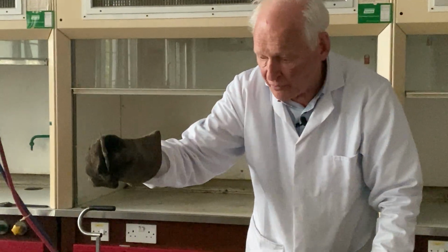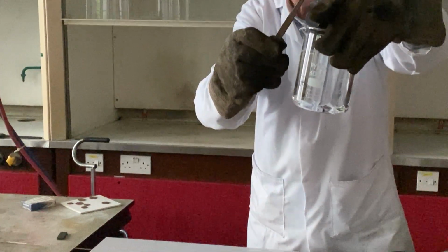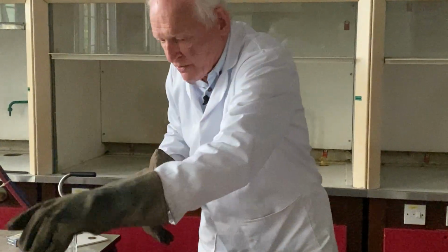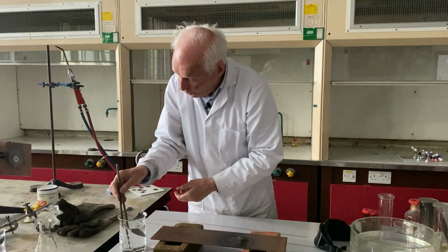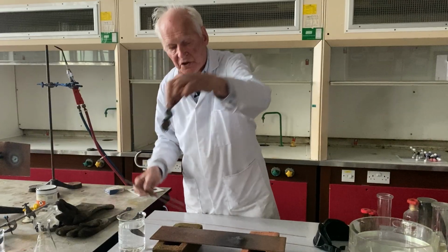Let's now cool it down. We drop it into our large beaker of water here. We can watch carefully. And there. And so now, very quickly, we can take our gauntlets off because this will be quite cool to the touch. And let's see. Not brilliant. It's by no means brilliant welding, but it's illustrated the principle.